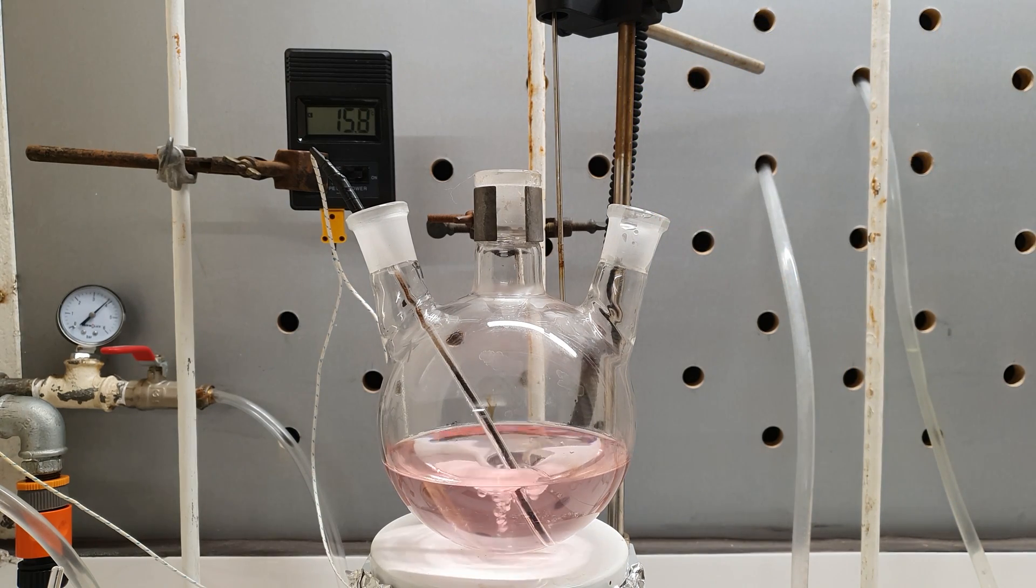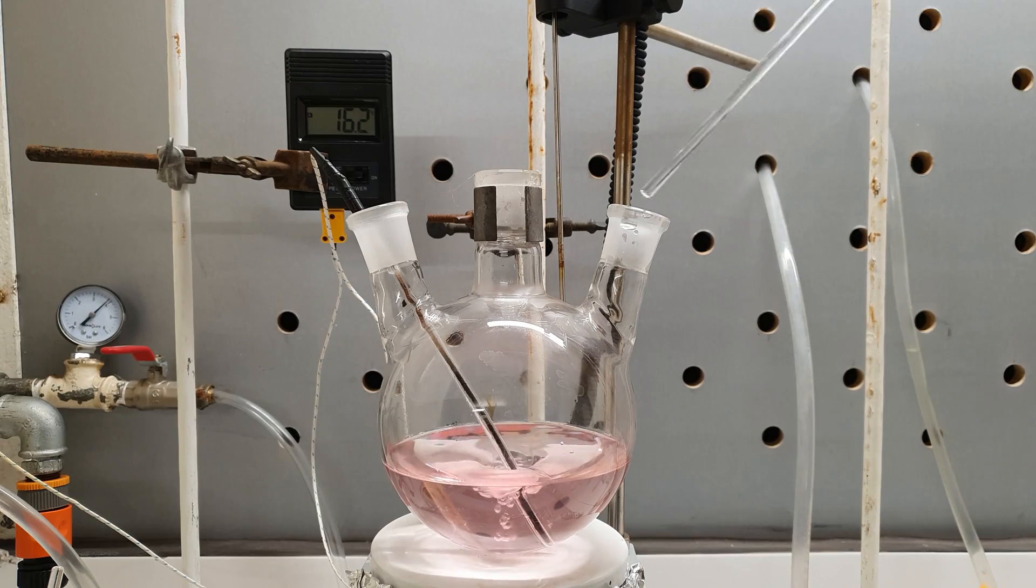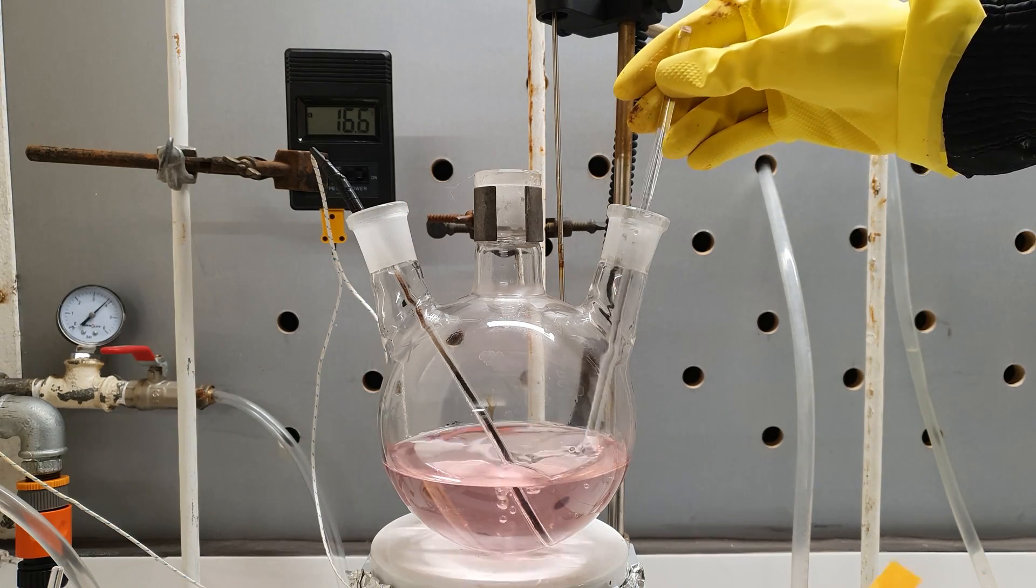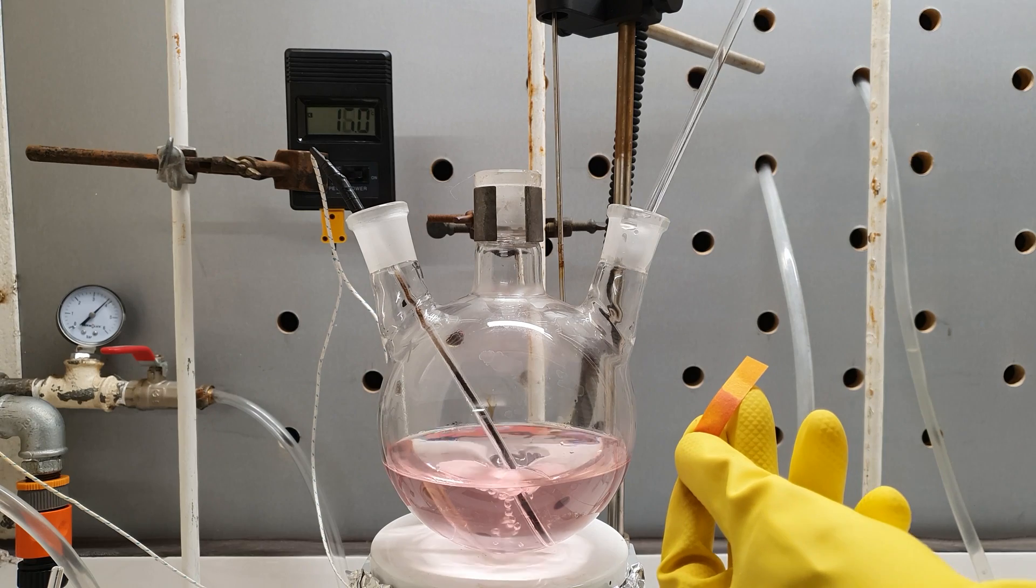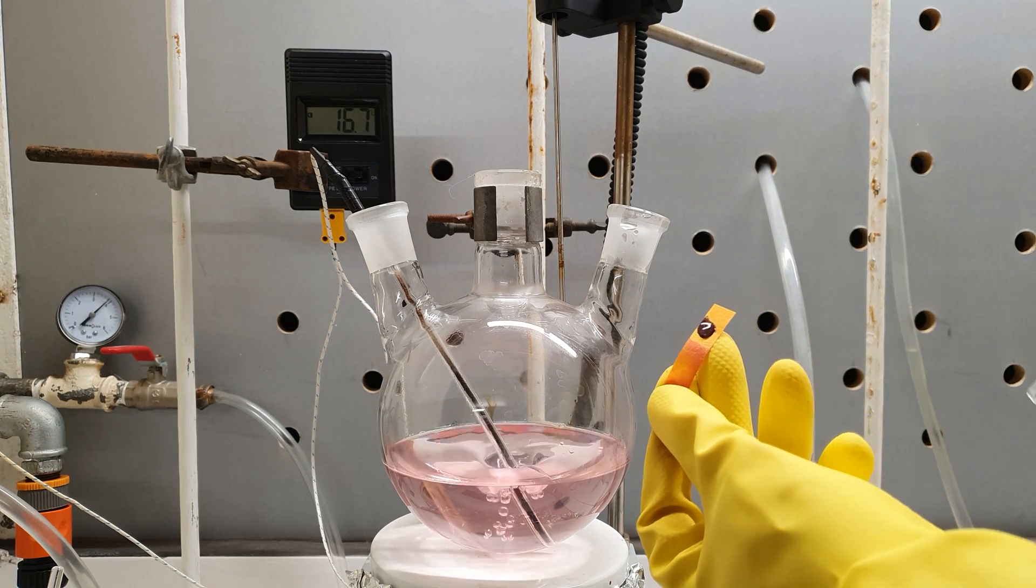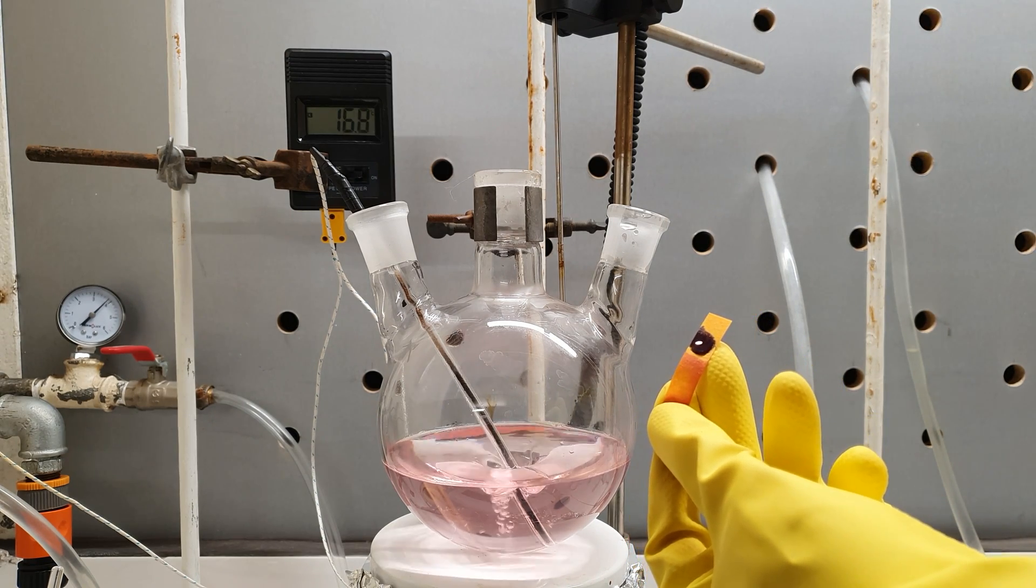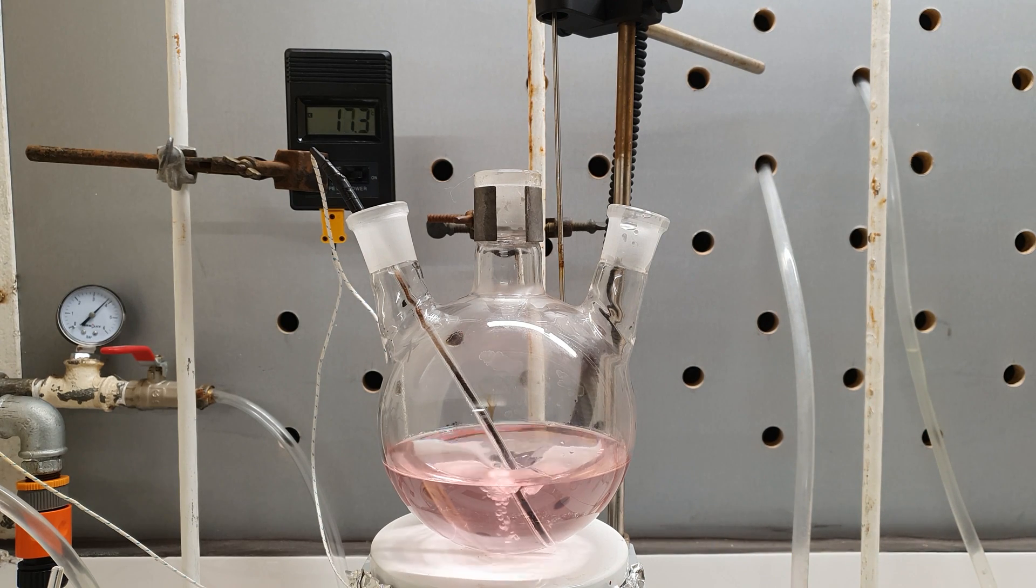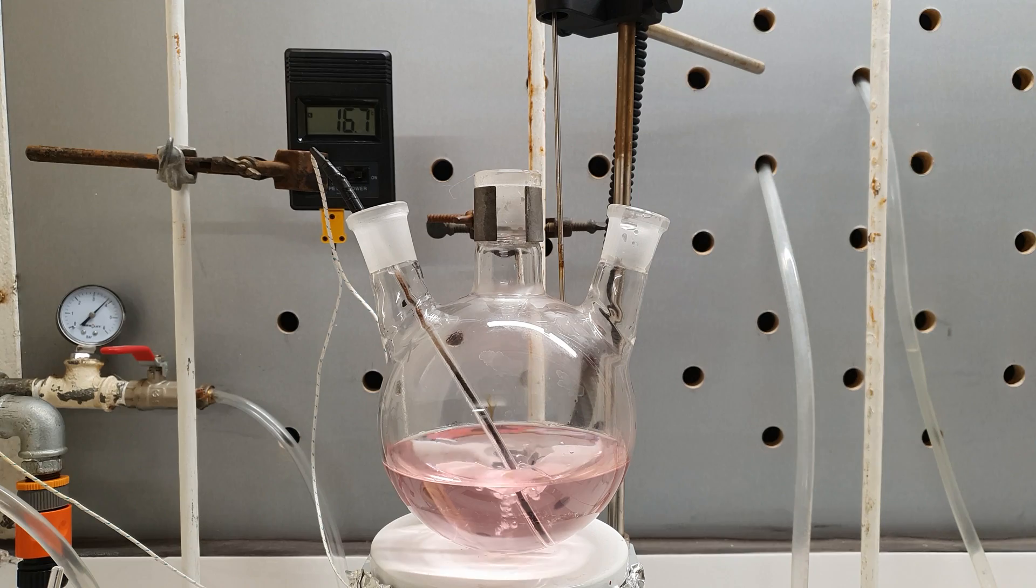The pH paper might even not have been needed because at one point the whole solution changed color. I instantly checked the pH value and it was basic. At this point all of the ice had melted, turning into water which will be the solvent for the reaction.